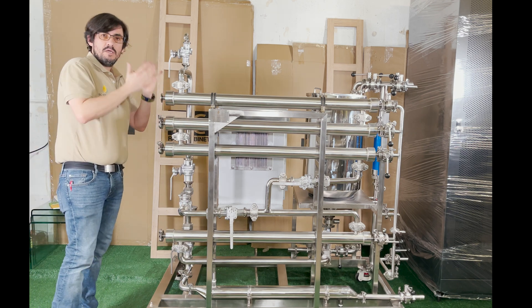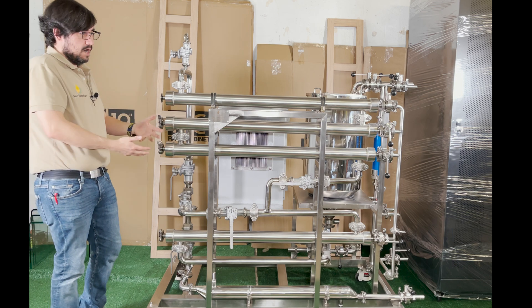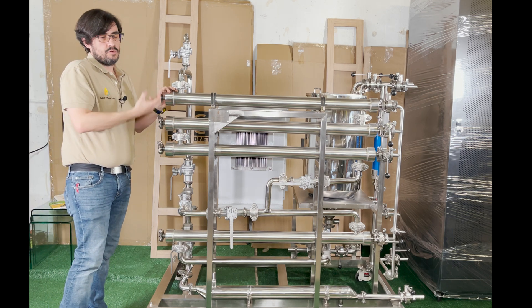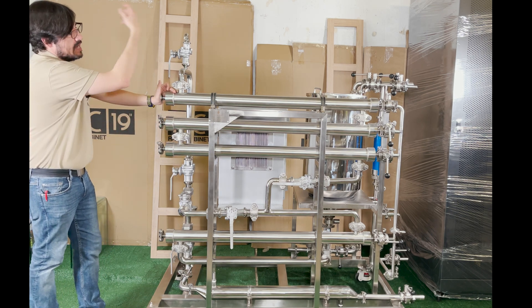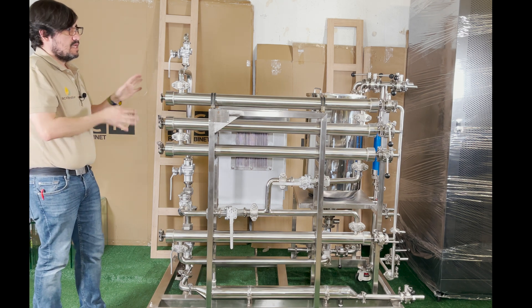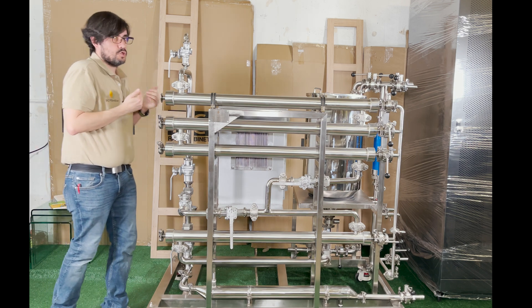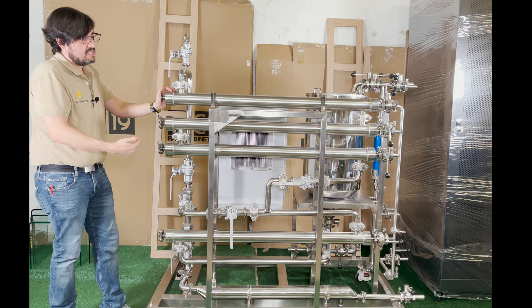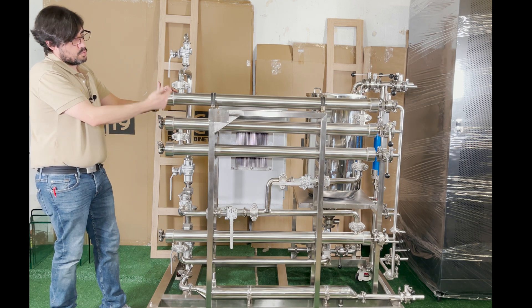Every time you run through the system, you're removing a significant portion of whatever you're trying to remove — whether that's the solvent or you're winterizing. So in a batch system, every time you recirculate, you've actually filtered it four times. And that's the difference between parallel flow, where it's filtered one time, and serial flow, where in series you filter in this machine one, two, three, four.